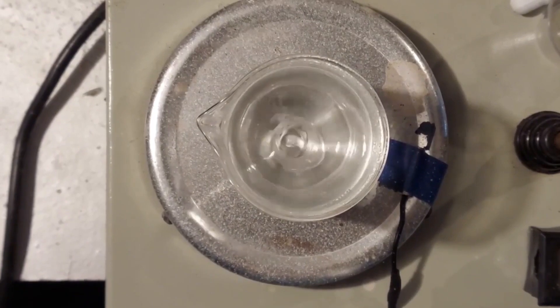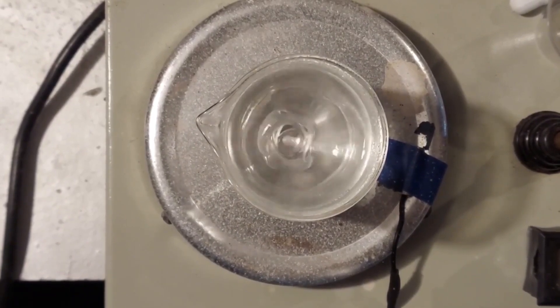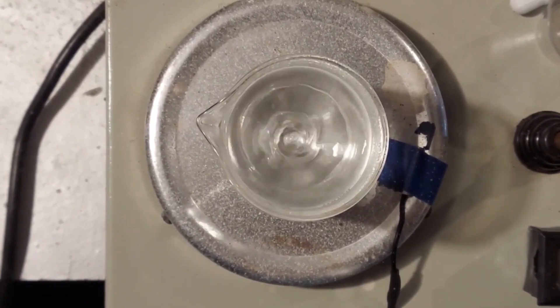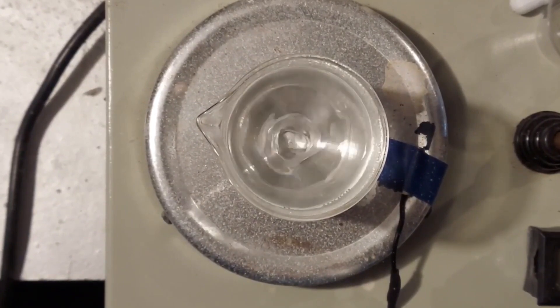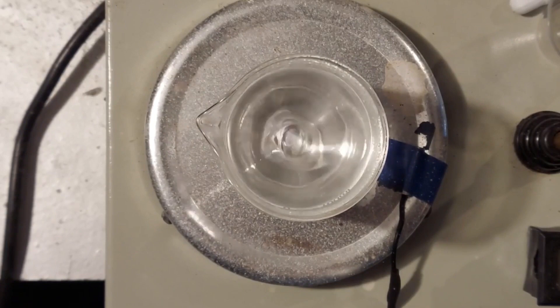All right, about 25 minutes later, it's all dissolved. There's some bubbles that are flying around in there because the water is pretty warm. It's 89 degrees Celsius right now. But everything's dissolved at this point. You want to turn off the heat, let it cool down for maybe 10 minutes on its own, and then put it in the fridge.